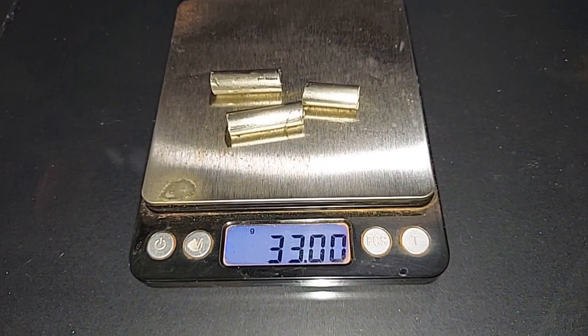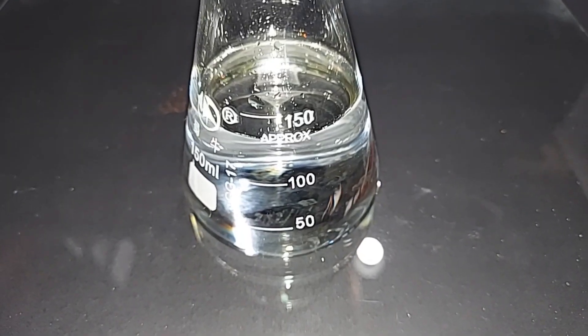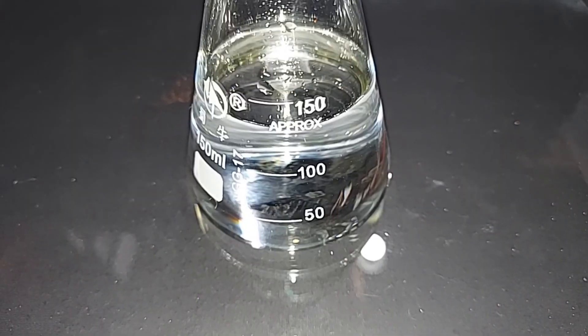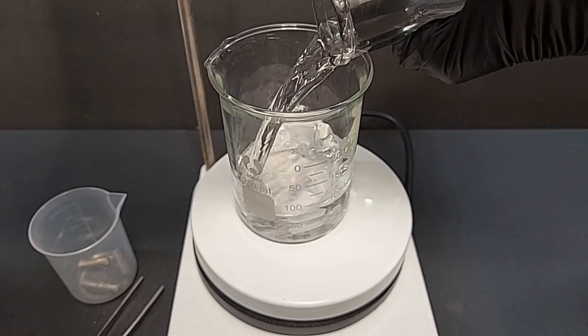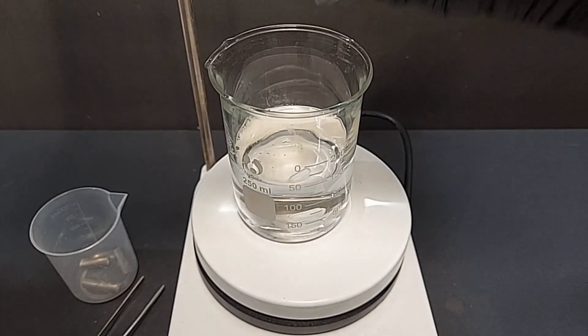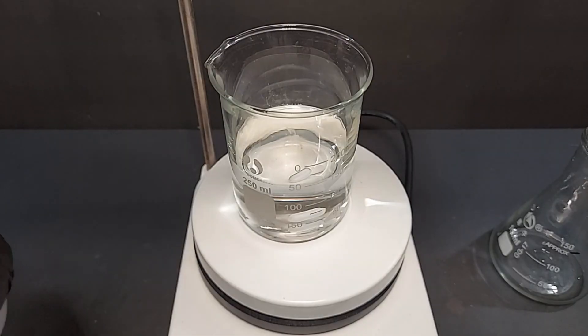This took a little bit of doing honestly, but here's 33 grams of pure nickel metal pre-weighed, and 140 milliliters of 70% nitric acid pre-measured. First thing, of course, is pour our nitric acid into this beaker here.